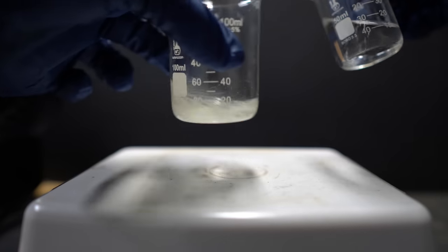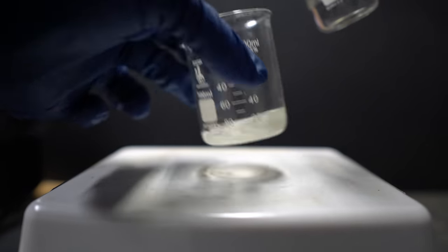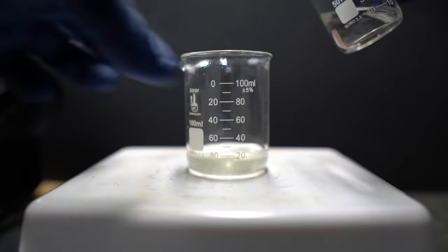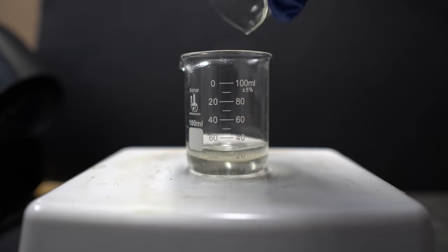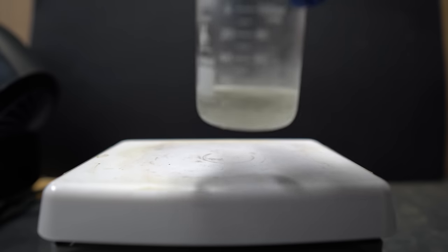You could technically use this and call it pretty much pure, but we're going to recrystallize and make it look a lot more cosmetically beautiful. Also doing a second recrystallization will remove any of the other impurities that are in there. As before, we're going to heat up the methanol, redissolve everything, and make sure that we use enough so everything's dissolved and that there's no crystals remaining in solution.